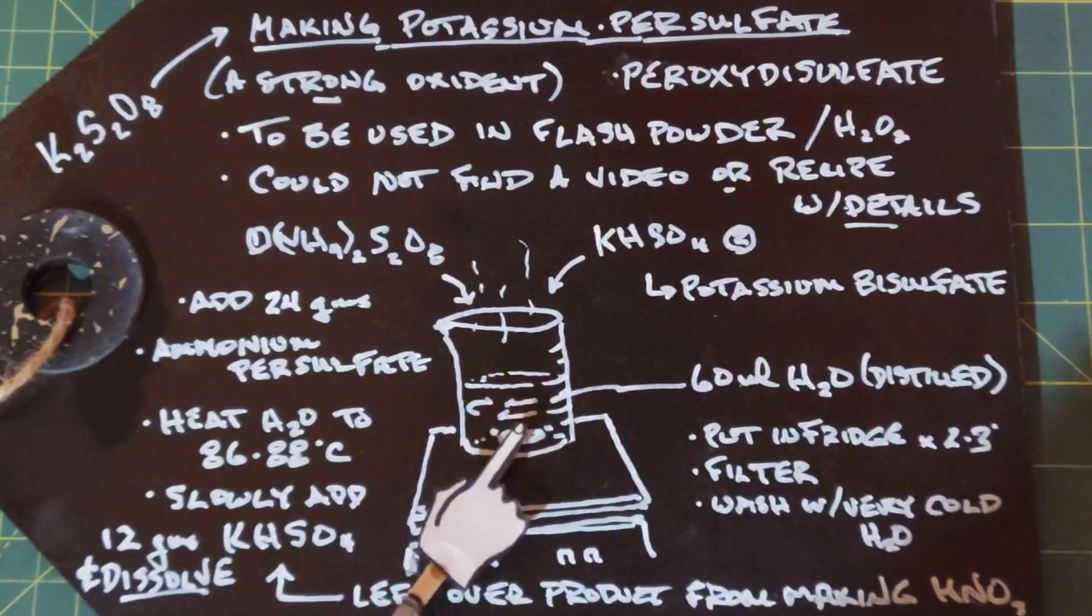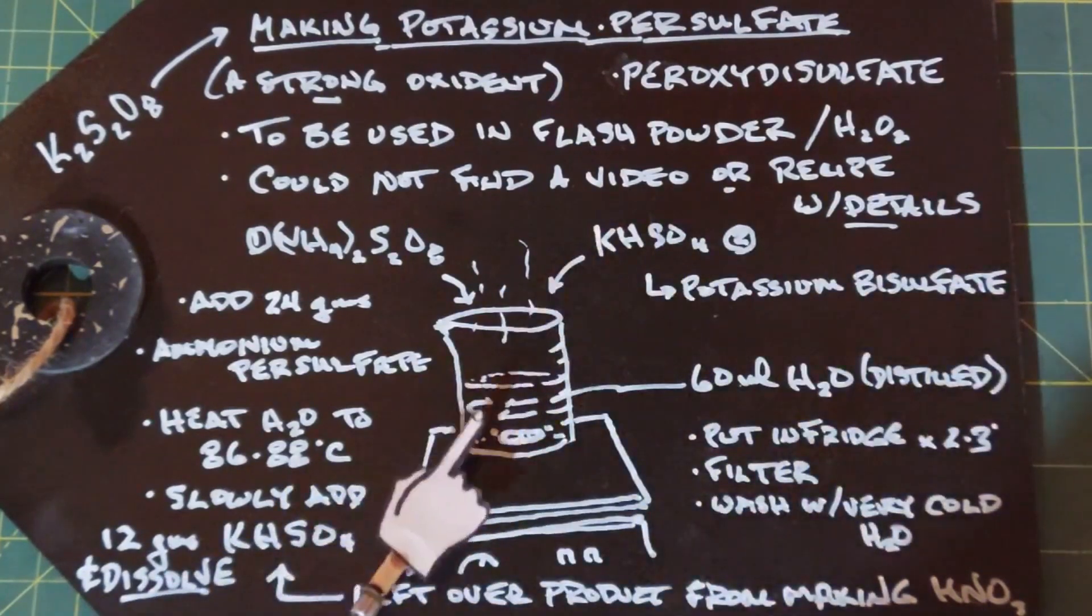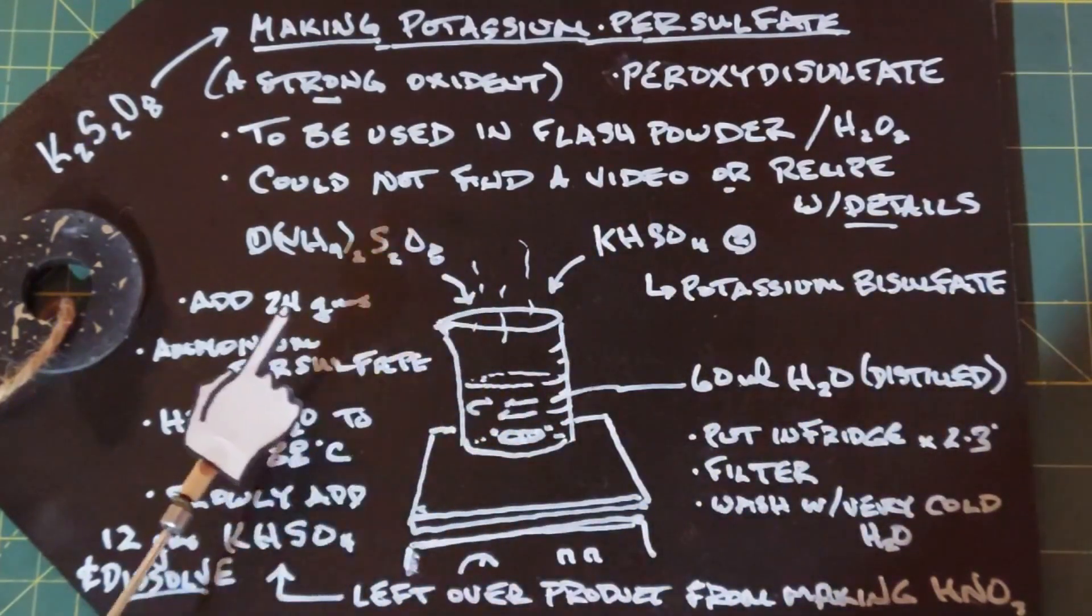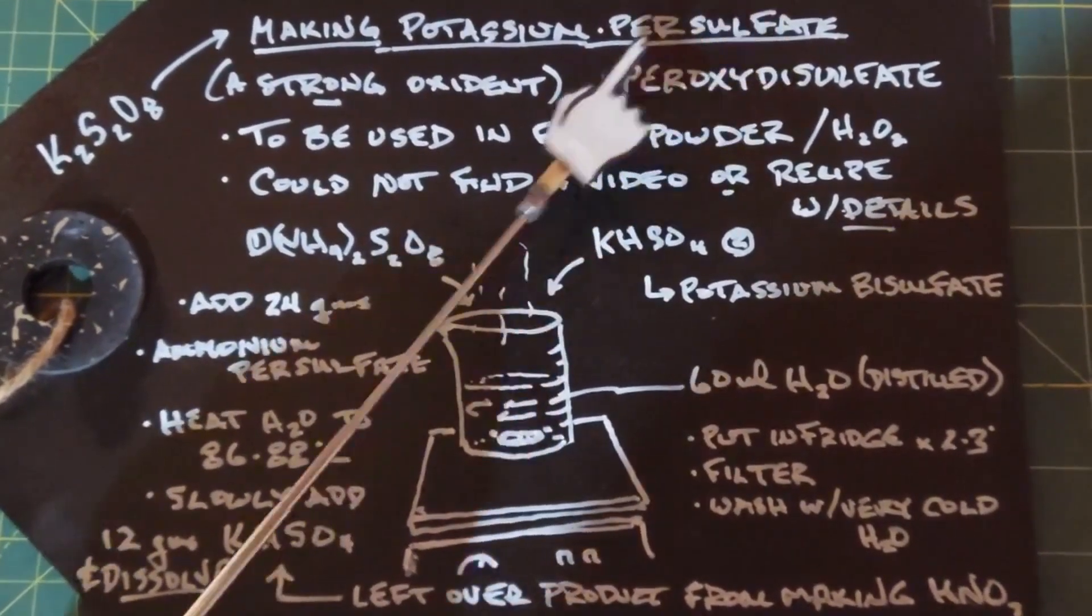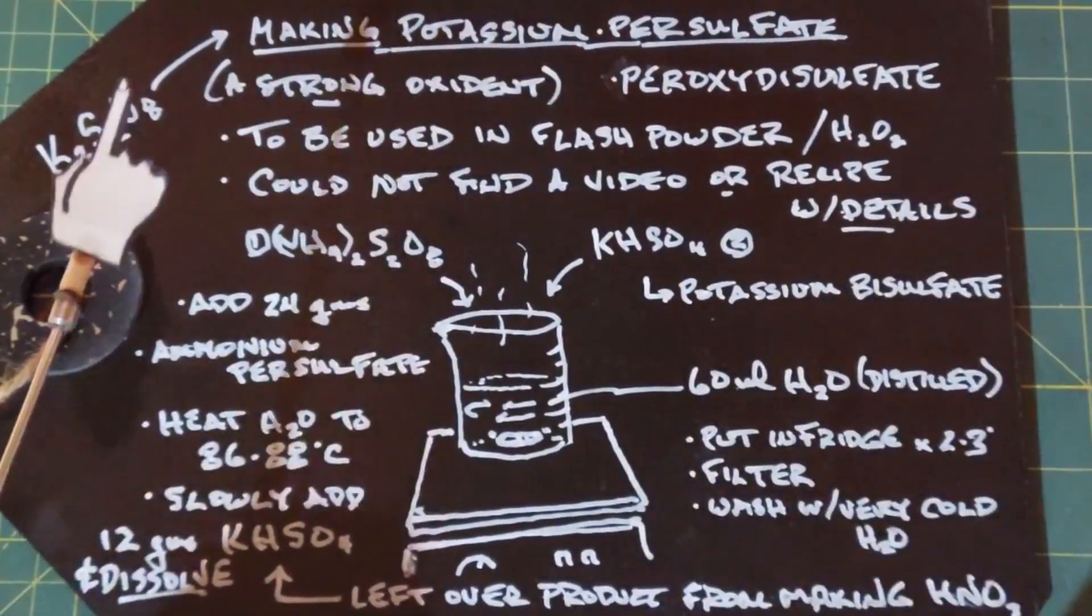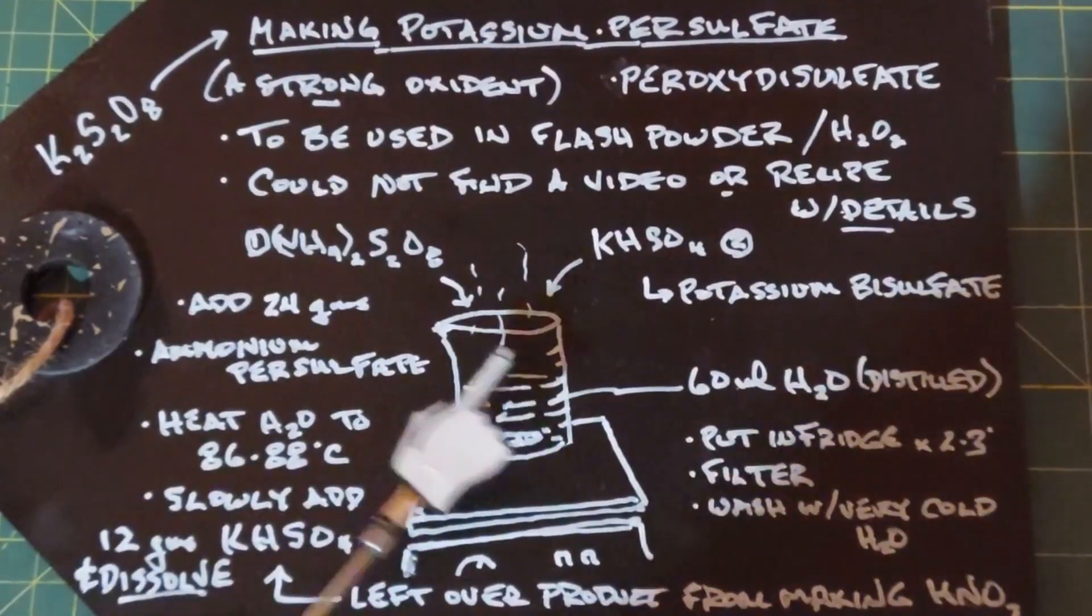It took a while, even with the stir bar, for the potassium bisulfate to completely dissolve. One of the characteristics of potassium bisulfate is that it does not dissolve well in cold water. So this is warm water.